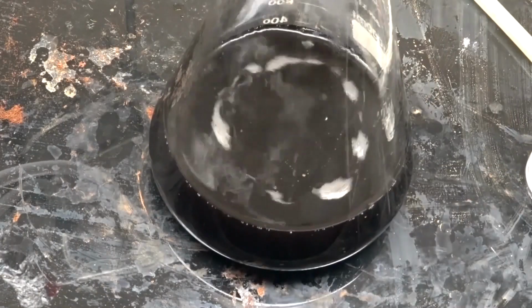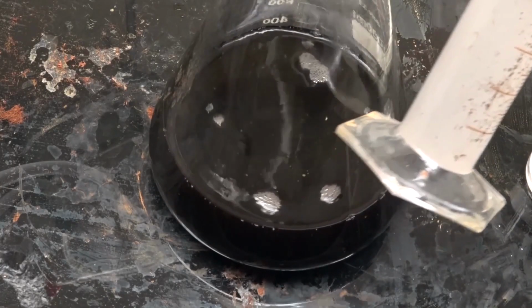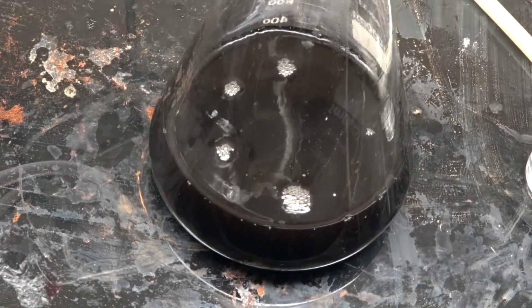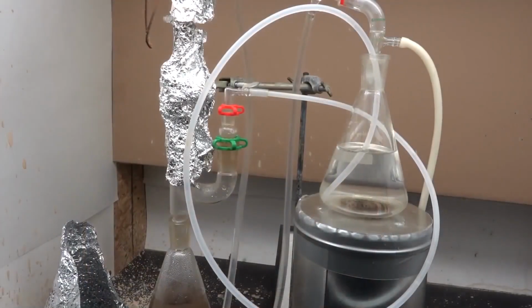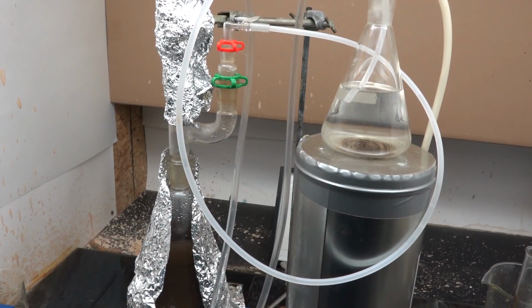So here we are. Now, while some of our chlorotoluene is in the Dean-Stark trap, most of it is here as a mixture of chlorotoluenes, chlorotoluene sulfonic acid, and decomposition products. To the mixture, add an equal amount of water. Stir it up until thoroughly mixed. Now assemble the Dean-Stark apparatus around it and set it up for light return mode. Now simply heat up the mixture until boiling and start collecting the heavier components.